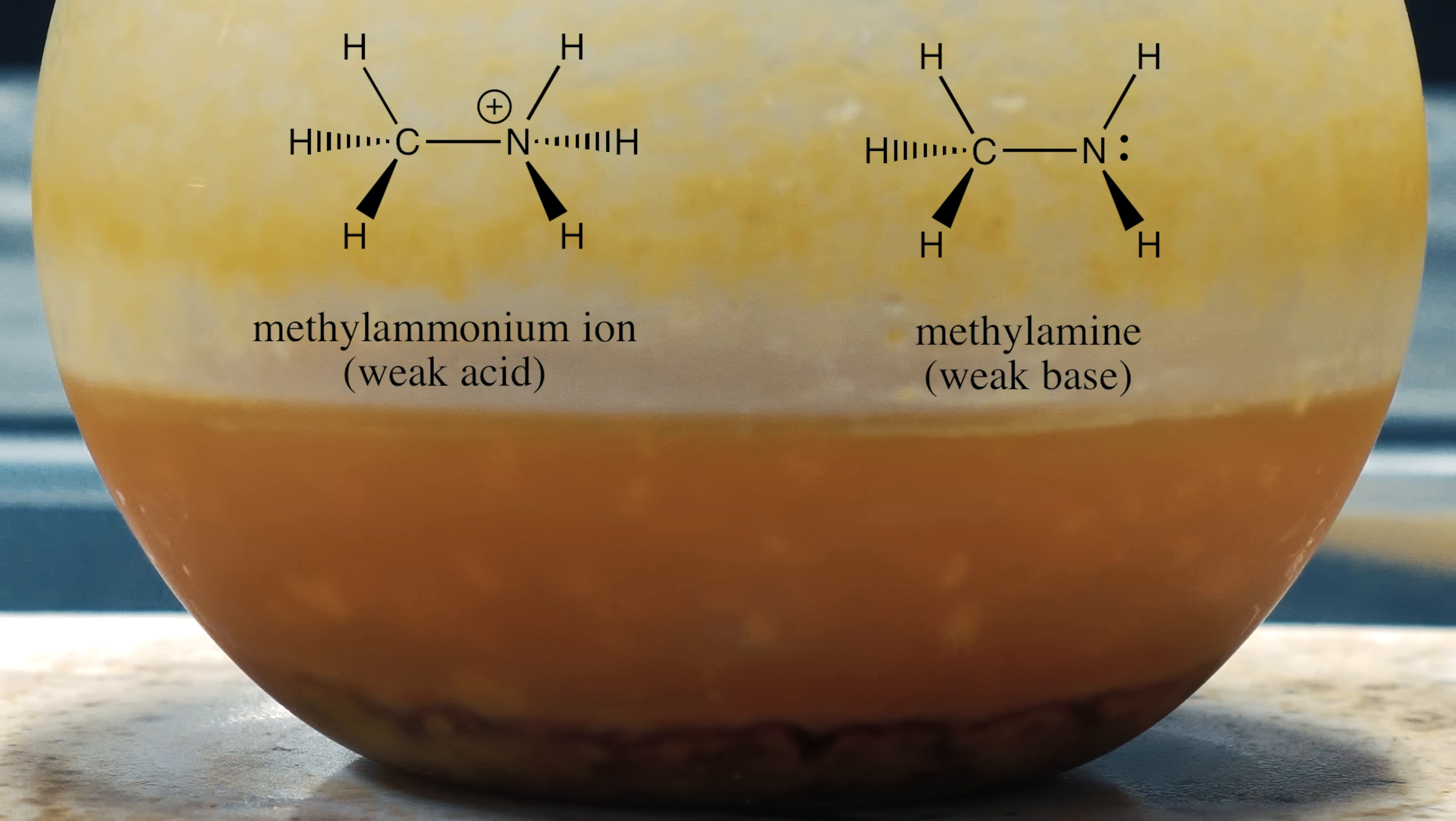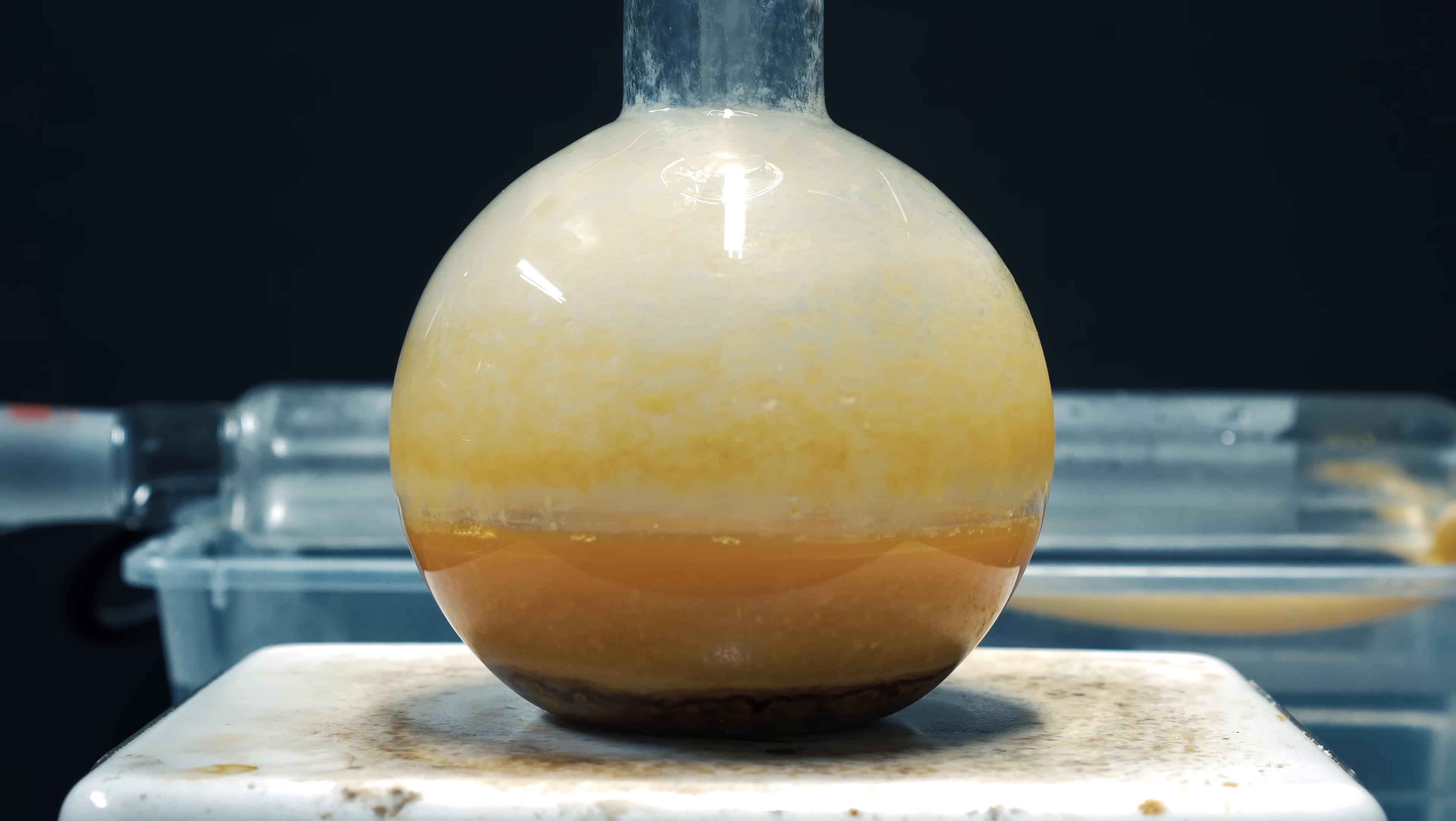Right now, methylamine exists as its conjugate acid, which is the methyl ammonium ion. We need this as methylamine so we can proceed on with the procedure. Once the solution is basic, we're essentially going to get methylamine as a gas as we heat it up. This way, we can just bubble the gas into a solution of hydrochloric acid and get our methylamine HCl.